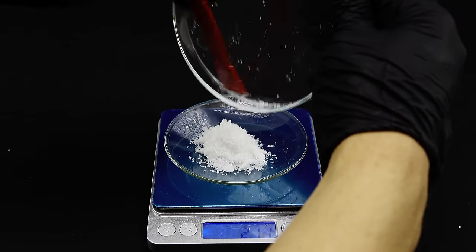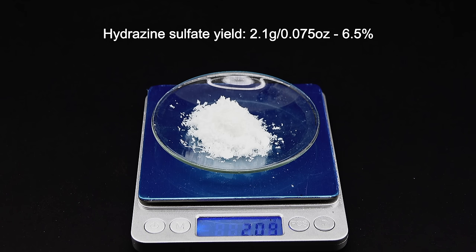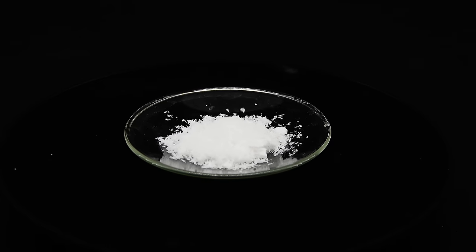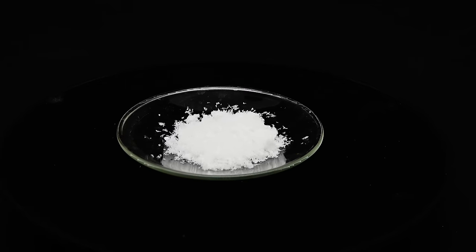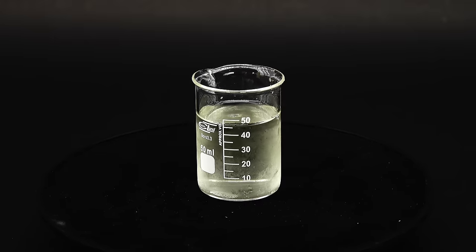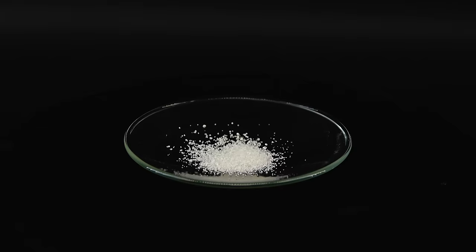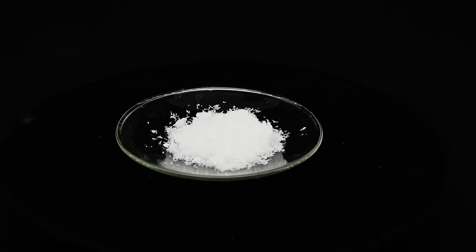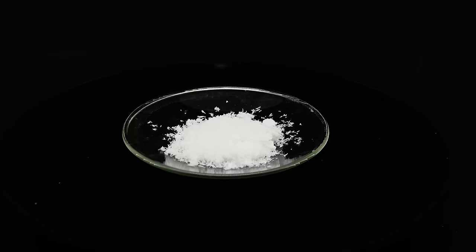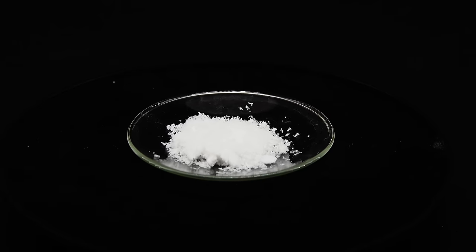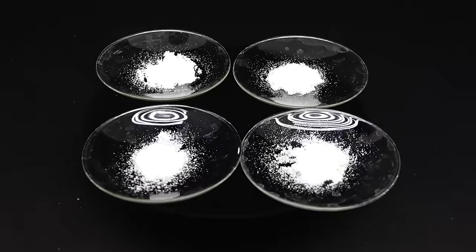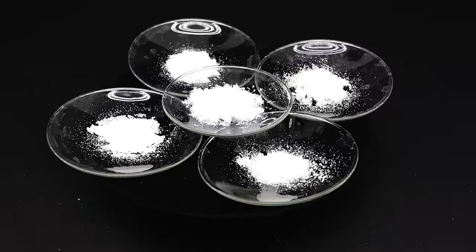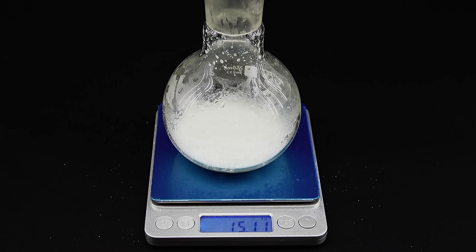Anyway, my final yield of flavored rocket fuel turned out to be a whopping 2.1 grams or 6.5%. This yield is crappy to say the least, and I expected at least something like 40%, but it seems that the chemistry gods didn't really want to bless me this time. This utter failure of a yield is probably due to the fact that there have been some contaminants in the bleach or it was a lower concentration than advertised. Also, I forgot to add some gelatin to the ammonia that is supposed to really help the ketazine formation, which is like a cherry on top of a crap yield cake. Anyway, after making the hydrazine sulfate, I originally wanted to proceed straight to turning it into hydrazine hydrate, but 2 grams of product is just unacceptable even for my standards, so I repeated the whole process 4 more times. This took me like 3 days, and even though I now remembered about the gelatin, the yield improved just marginally, being on average 3 grams, giving me a total of 15 grams of hydrazine sulfate that had to be enough for the next step.